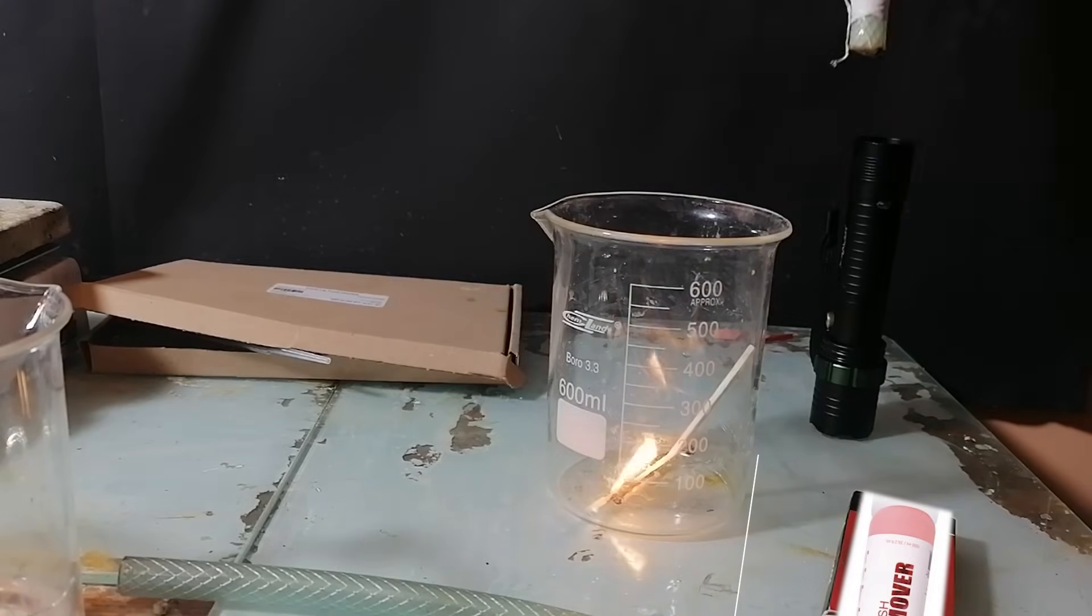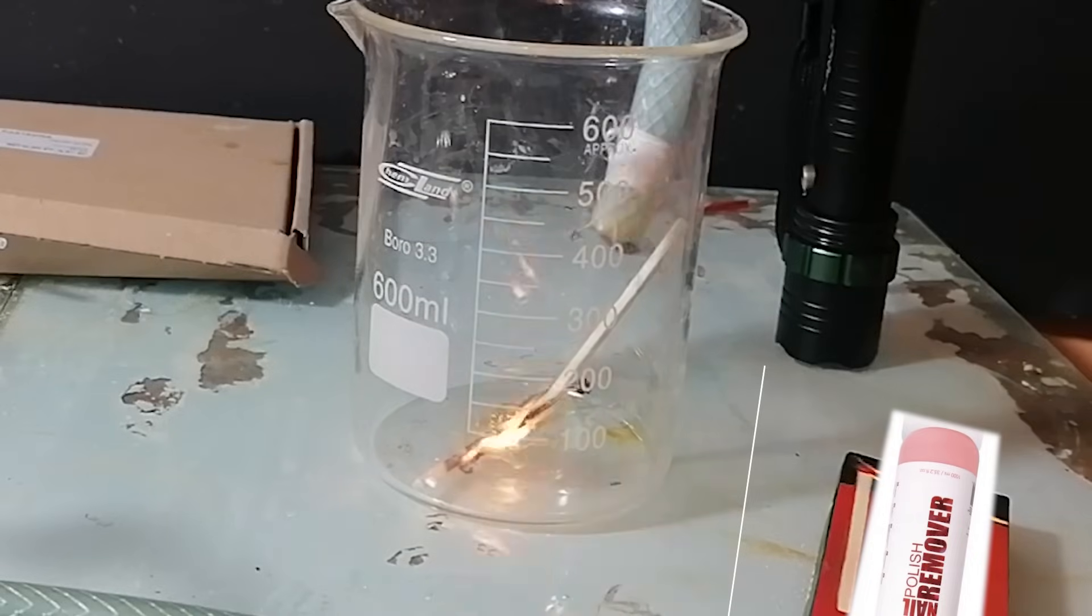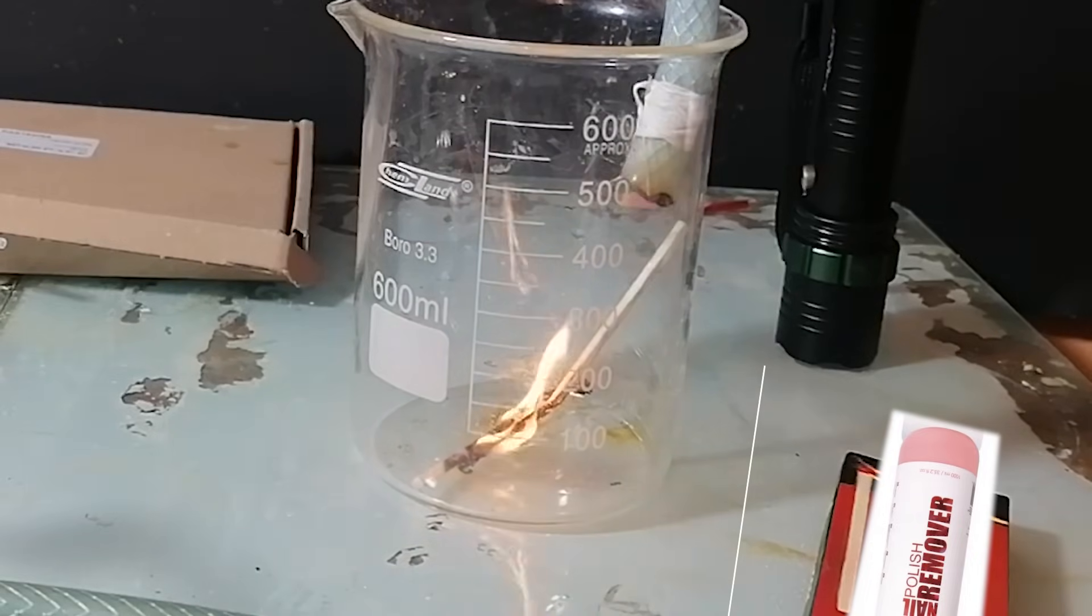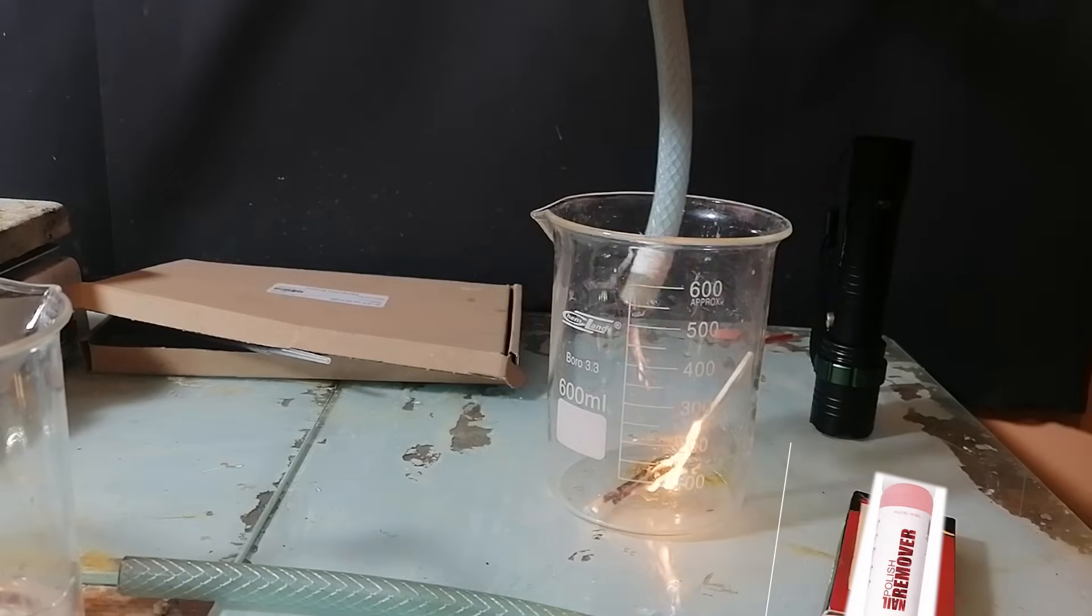As you all know, oxygen is pretty much the perfect oxidizer. Well, oxidizer oxygen, you get the thing. And that's why the match started burning pretty intensely.